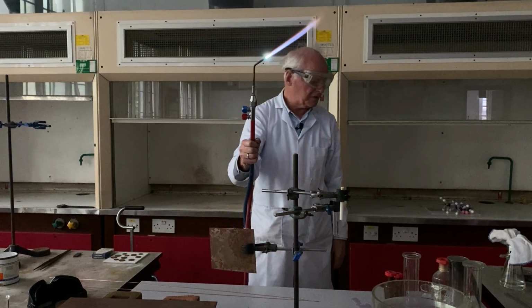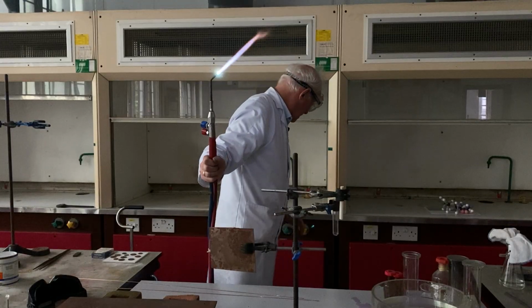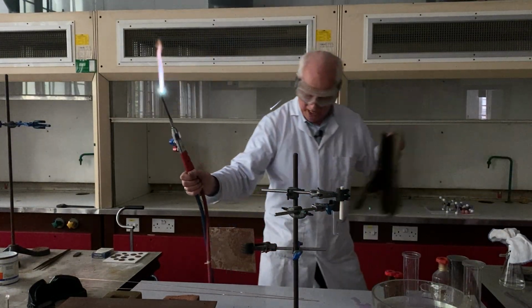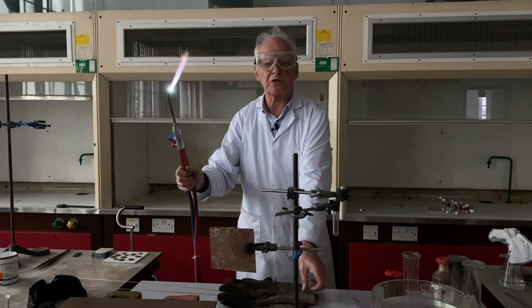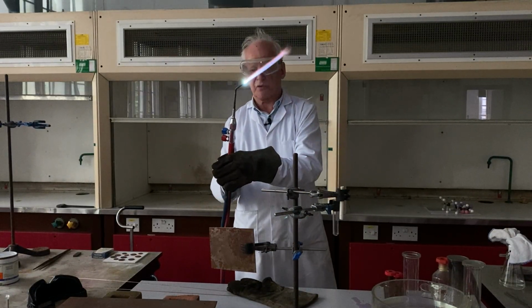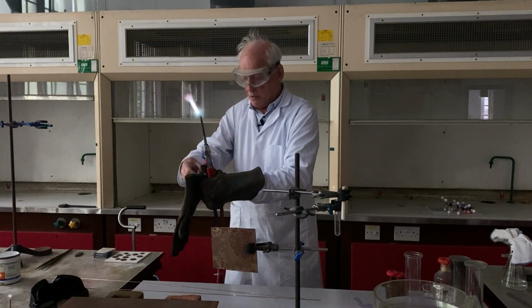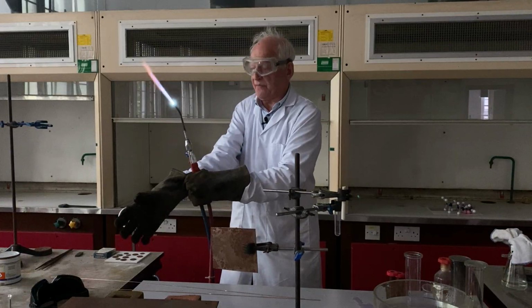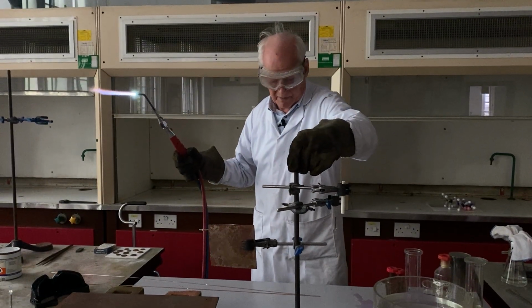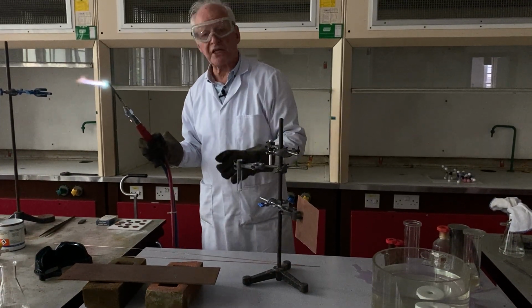Of course, in a Bunsen burner we have air and methane, but here we have what? So I'm looking for my gauntlets. Just found my gauntlet. Obviously, if I'm going to be making things very hot, then clearly it makes sense to have some sort of protection from heat for my hands. So if you don't mind, we'll just put on the glove here, and then we shall show you some simple experiments. Now, the first experiment I wanted to show you is how the flame affects glass.